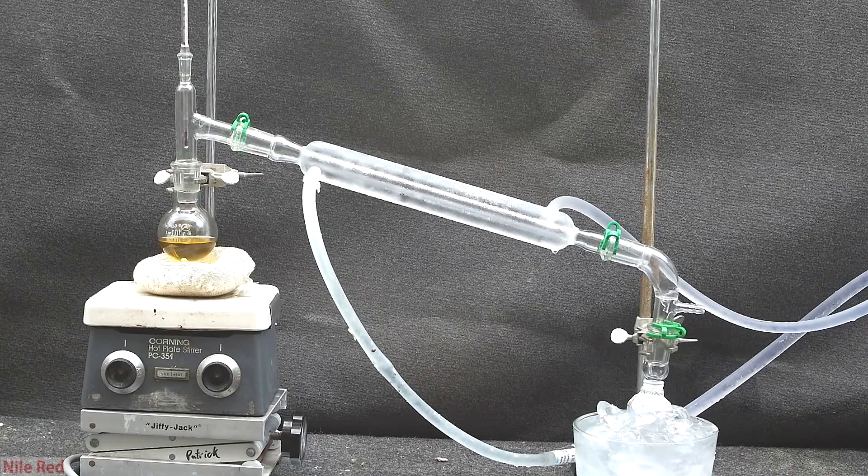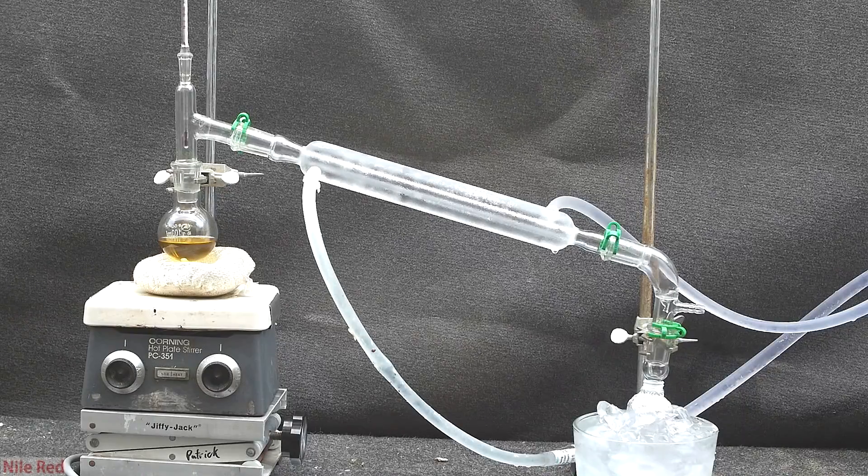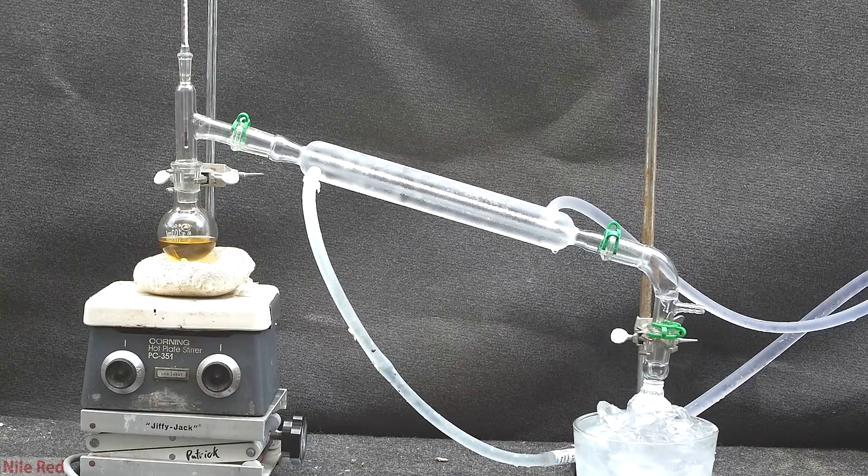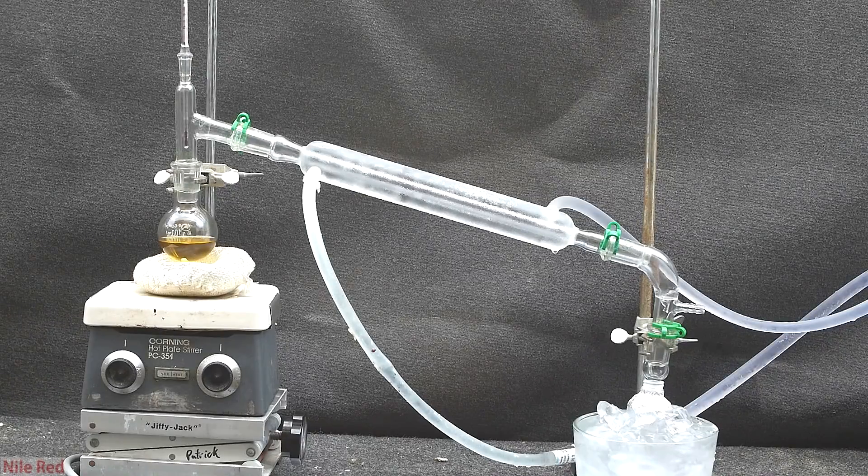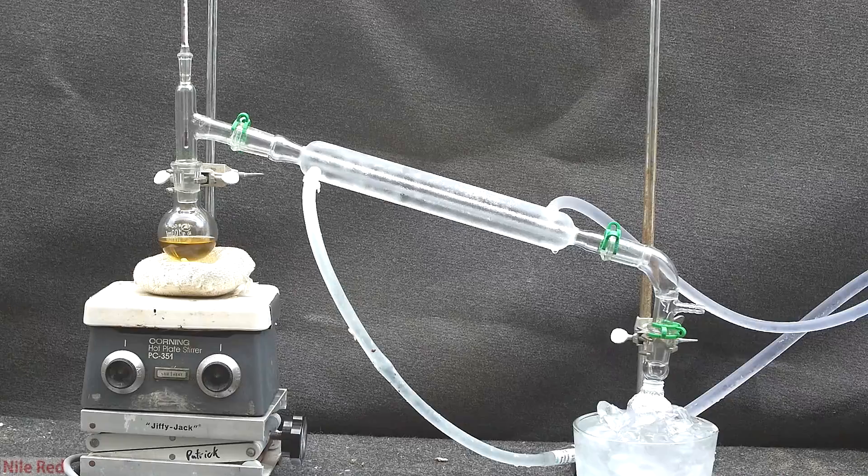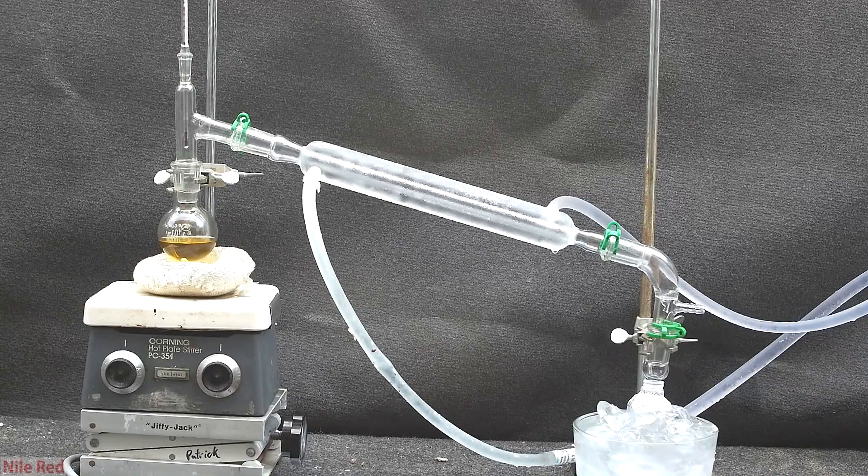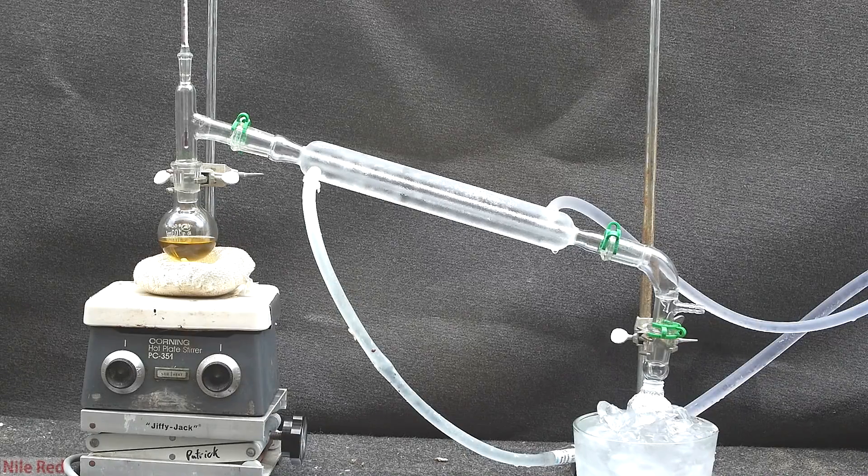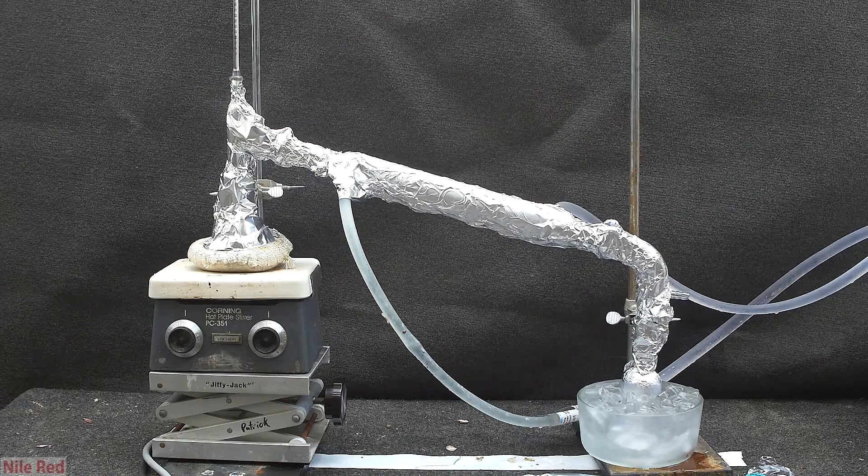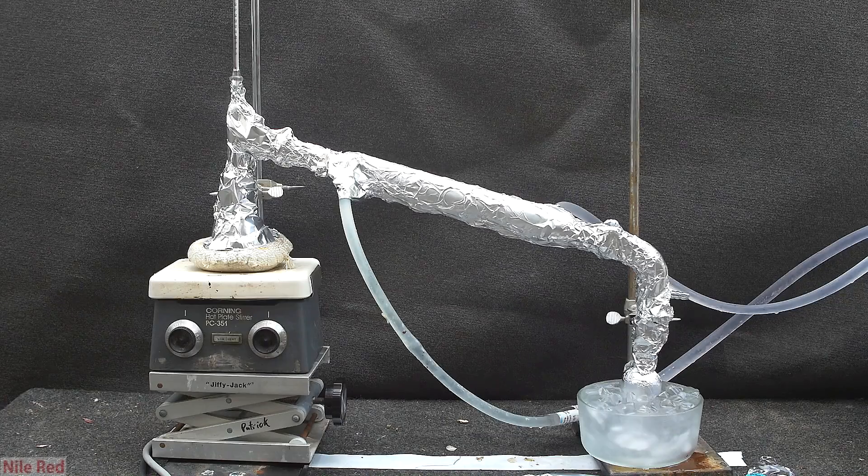The receiving flask is a pre-weighed bottle that contains about 1 gram of hydroquinone. The goal here is to distill all of the acrolein directly into the bottle, and then immediately seal it so we don't have to worry about any transferring steps. You should also notice that the condenser has ice cold water running through it, and the receiving bottle is chilled with ice. And just like before, we cover everything with aluminum foil to try to limit the polymerization.